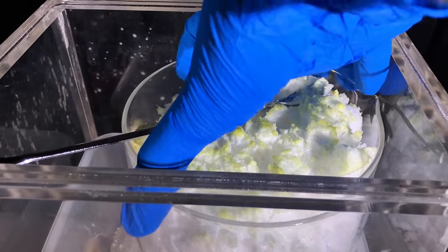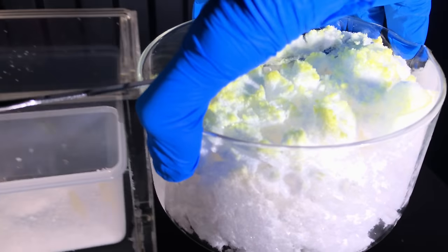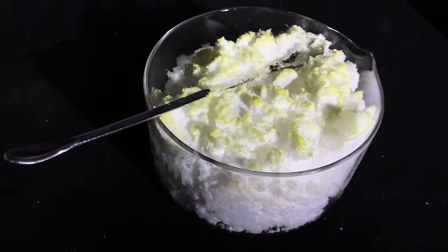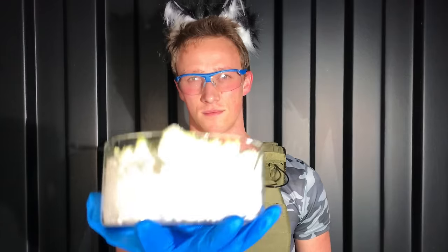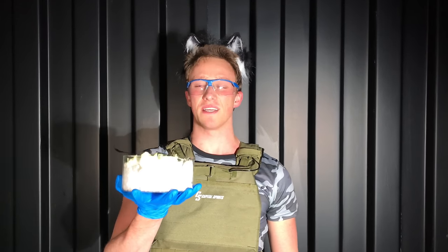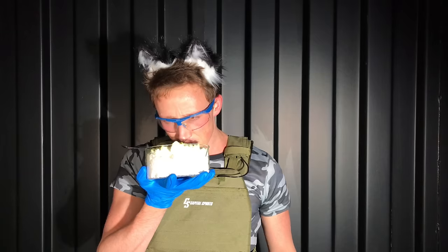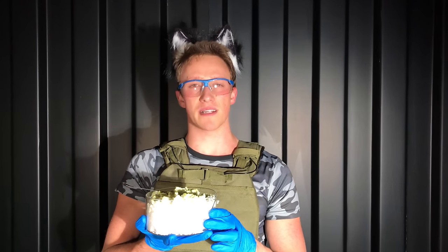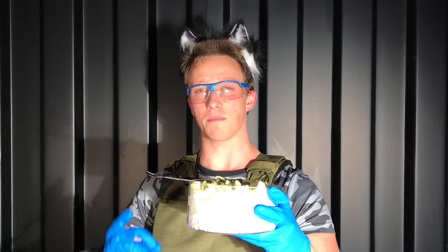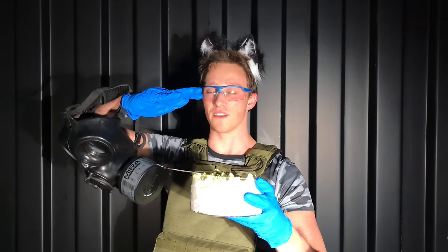That's my fault and it happened because I did not clean out the chamber and still had something interesting sticking to the walls. And there you go, here's your finished tear gas. You guys are probably wondering what this tear gas smells like and it's solid fun, because I'm not wearing a gas mask right now and like this it's not that bad. Like this it smells somewhat pepper like, but it doesn't have a very strong smell. When messing around with the solid tear gas we are going to get particles in the air and they are going to be tear inducing, therefore I will be wearing one of these.